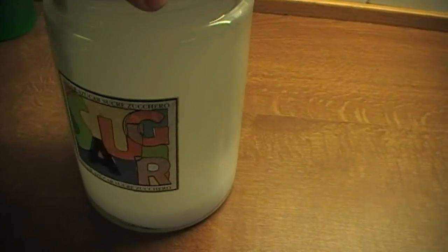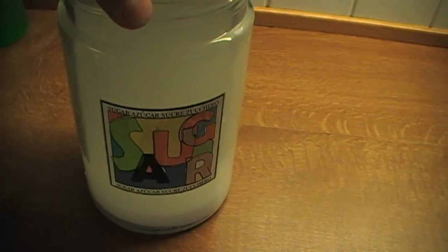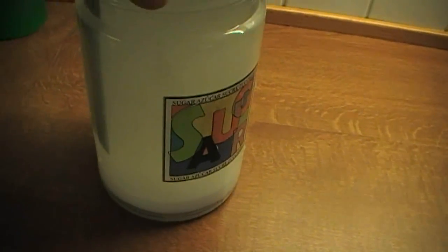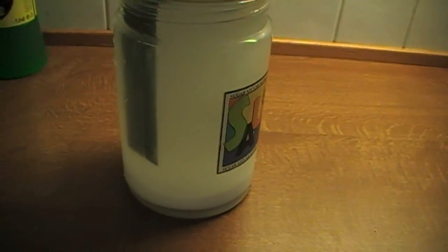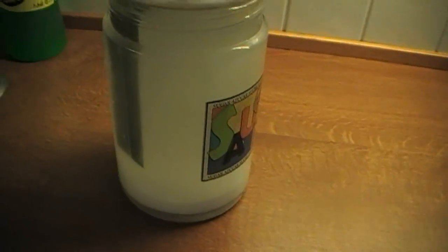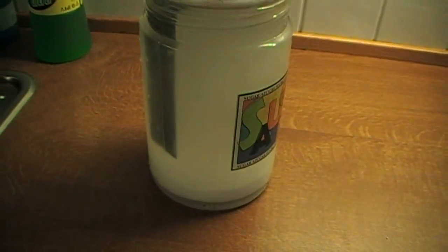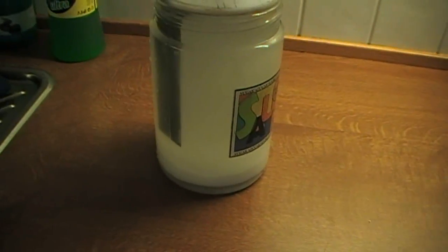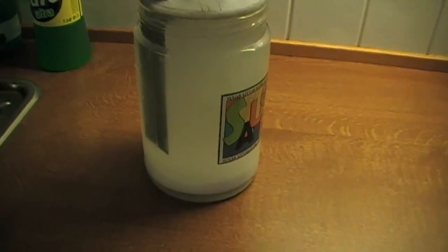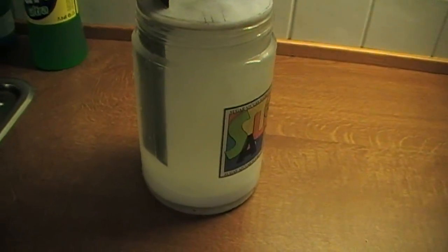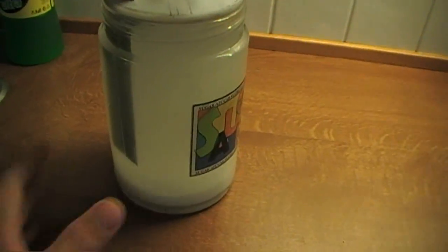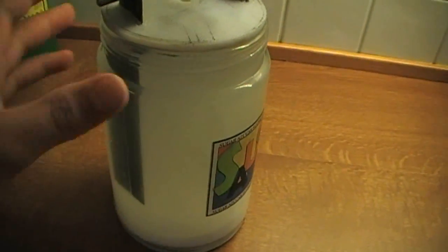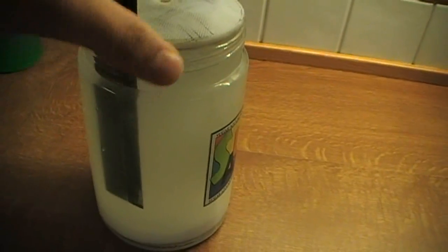Alrighty now I've added our saturated solution. It's just an easy part. You just measure out how much water your container takes and you take about that much and then you just pour in salt and boil it and add as much salt as you can, try to dissolve everything and if something doesn't dissolve it's alright but then you take the liquid and pour it into it. Be careful so the glass just doesn't pop, that's important.